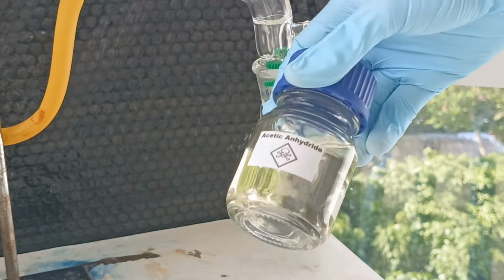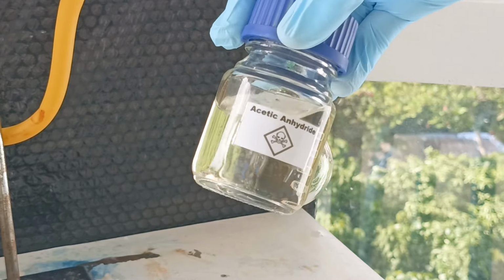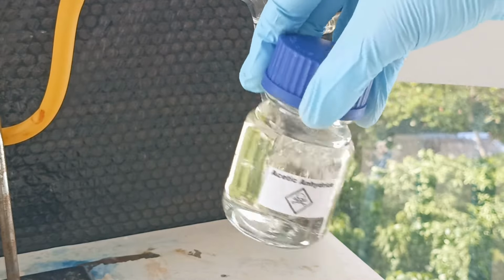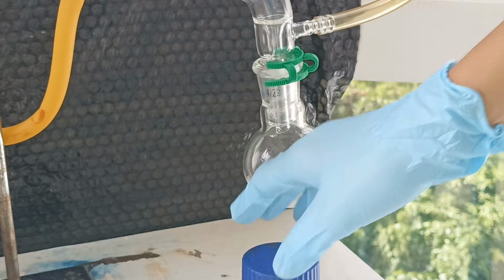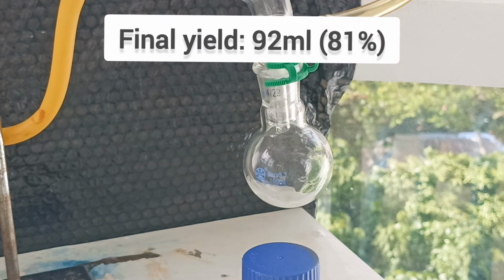And there we go, we've now made some pretty pure acetic anhydride. If you want to use this for syntheses and for some more analytical purposes, I recommend distilling this at least 2 more times, but it's good enough for what I need. The final yield of acetic anhydride was 92 milliliters, which corresponds to a yield of around 81%.